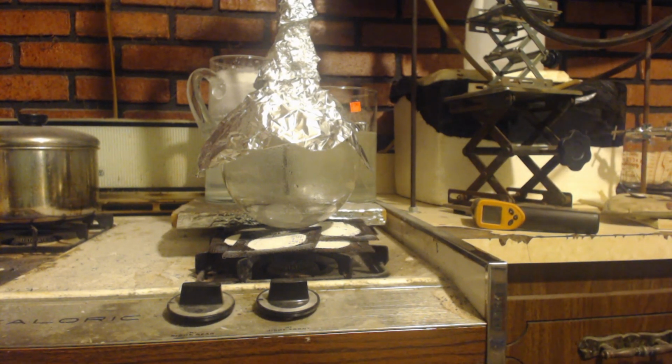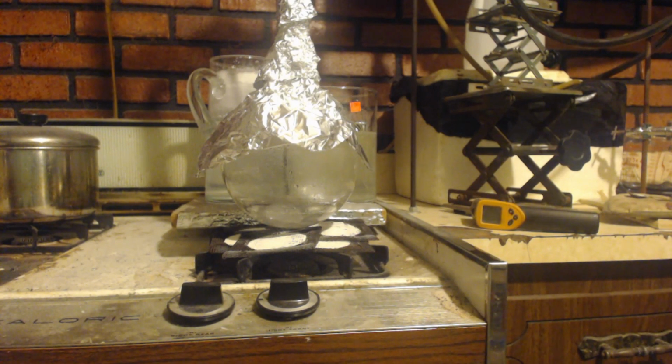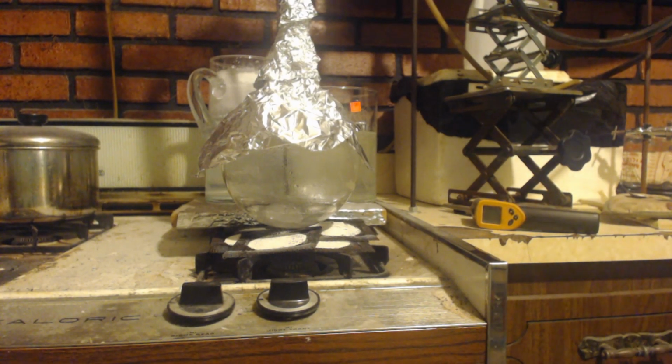But I wanted to see what kind of yield I would get by just not having everything anhydrous from the get-go. You know what I mean? It's a lot faster that way. But you can see that obviously you need to at least start with no water and try to get rid of some of the water during the reaction.